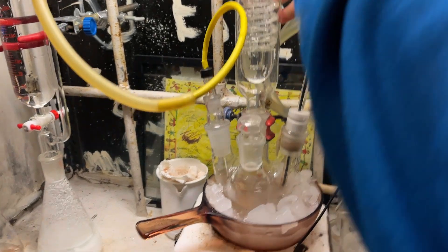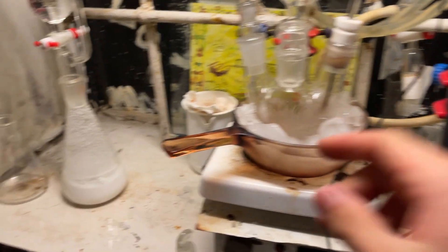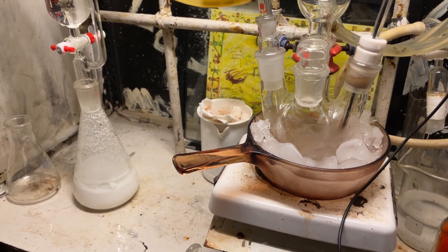Okay, so here, let's just jump into reaction. So we're trying to make chloral again. Should I mute this? Nah, it doesn't matter.